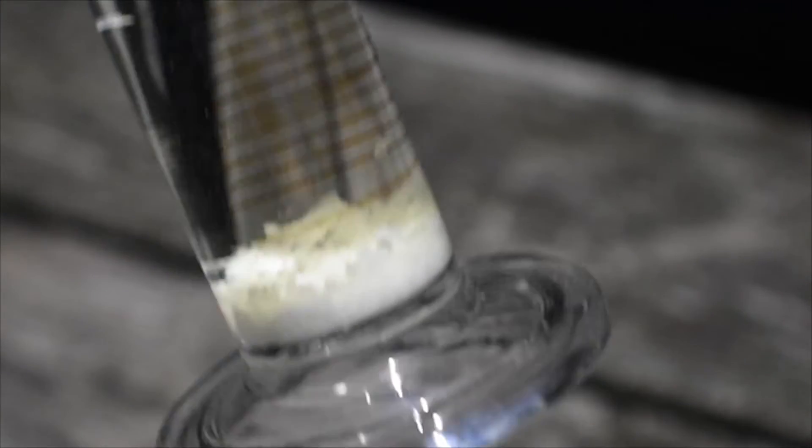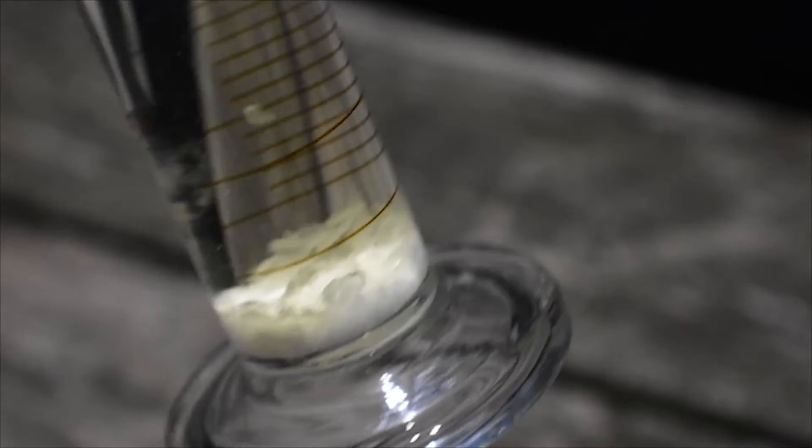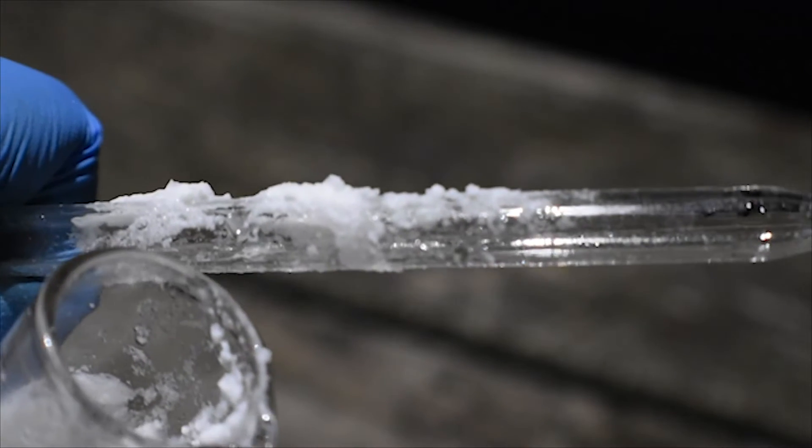Now that gas generation is done, we can see that we have some nice crystals in the graduated cylinder, both at the top and bottom. There was a little bit of oil at the beginning, but it quickly crystallized into a solid mass at the bottom. There's also some on the pipette that I used to lead the chlorine into the cylinder. Now we just have to collect it.